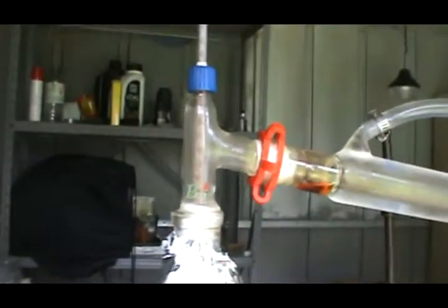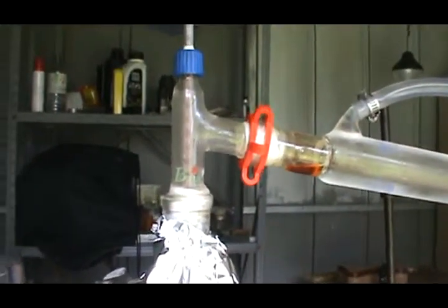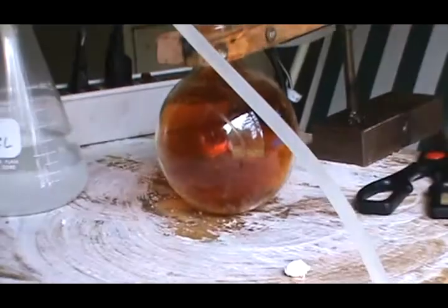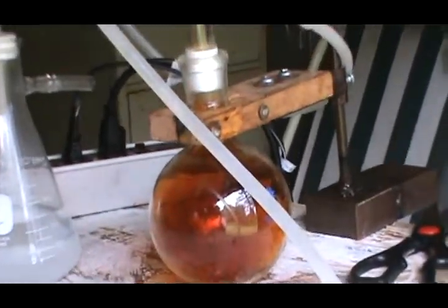Now we're up to temperature about a hundred and something degrees. You can see the condensation and all the fumes condensing so I'll be getting my first drops of nitric acid. I should really have some ice bath for my receiving flask but I ran out of ice.